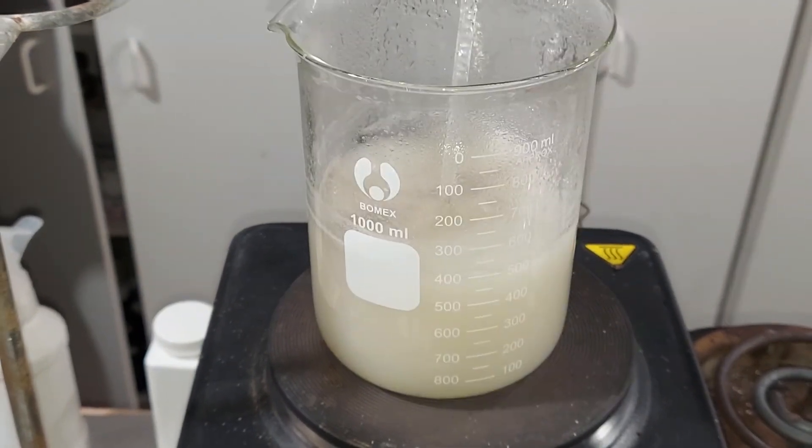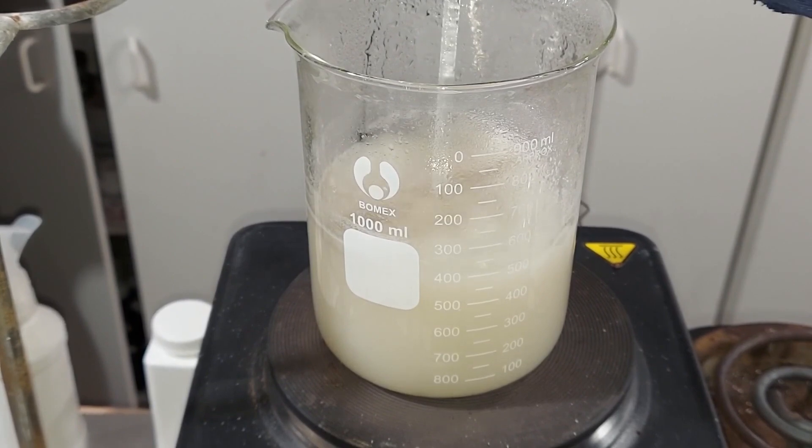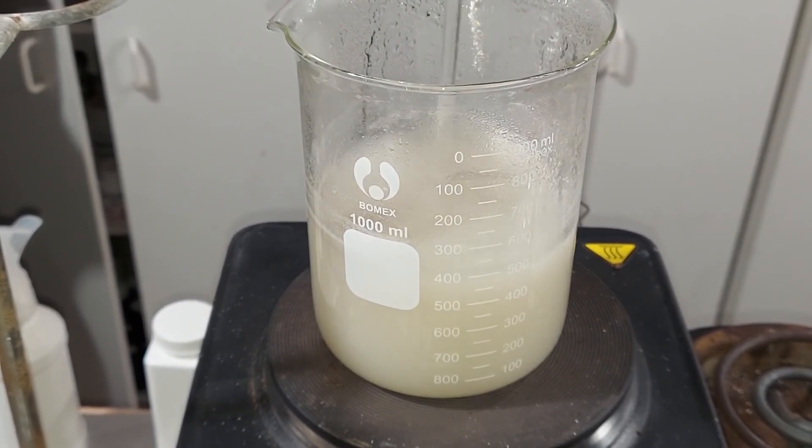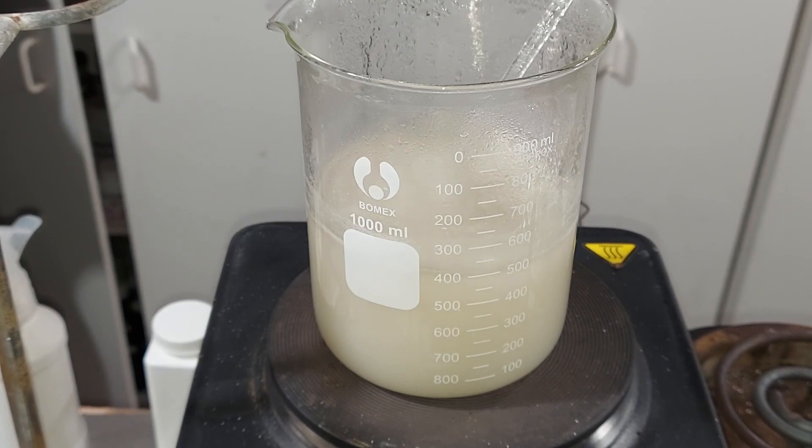Okay, I'll be back. This came to a nice boil. In here of course we have our potassium nitrate already formed. We also have ammonia chloride and calcium chloride that we'll get rid of as we go on to the next steps of purifying the potassium nitrate. But what I notice is there's quite a bit of sediment in there bouncing around. So I'm gonna let this settle down. That's probably anti-caking agents. Let that fall to the bottom and then pour only the liquid into a new beaker.